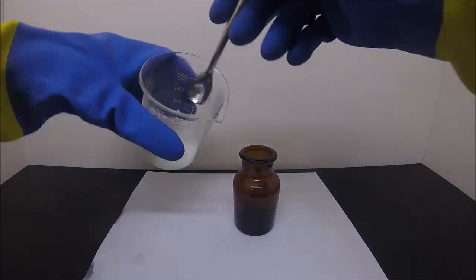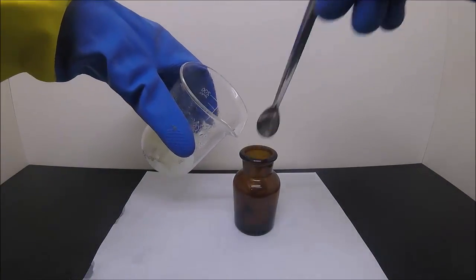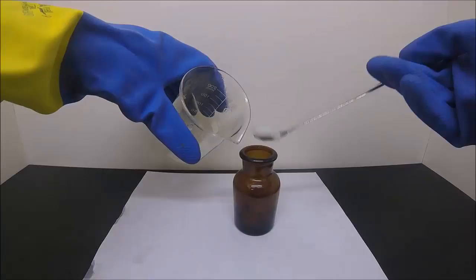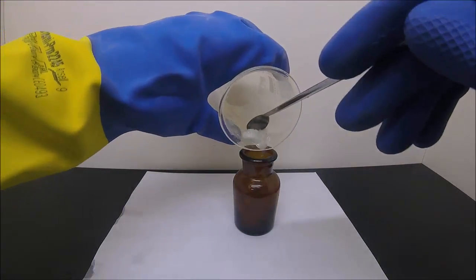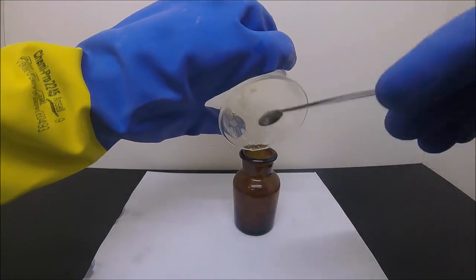The contents in the beaker are then transferred into a brown storage bottle. As silver nitrate degrades when exposed to light, I opt not to dry the crystals.